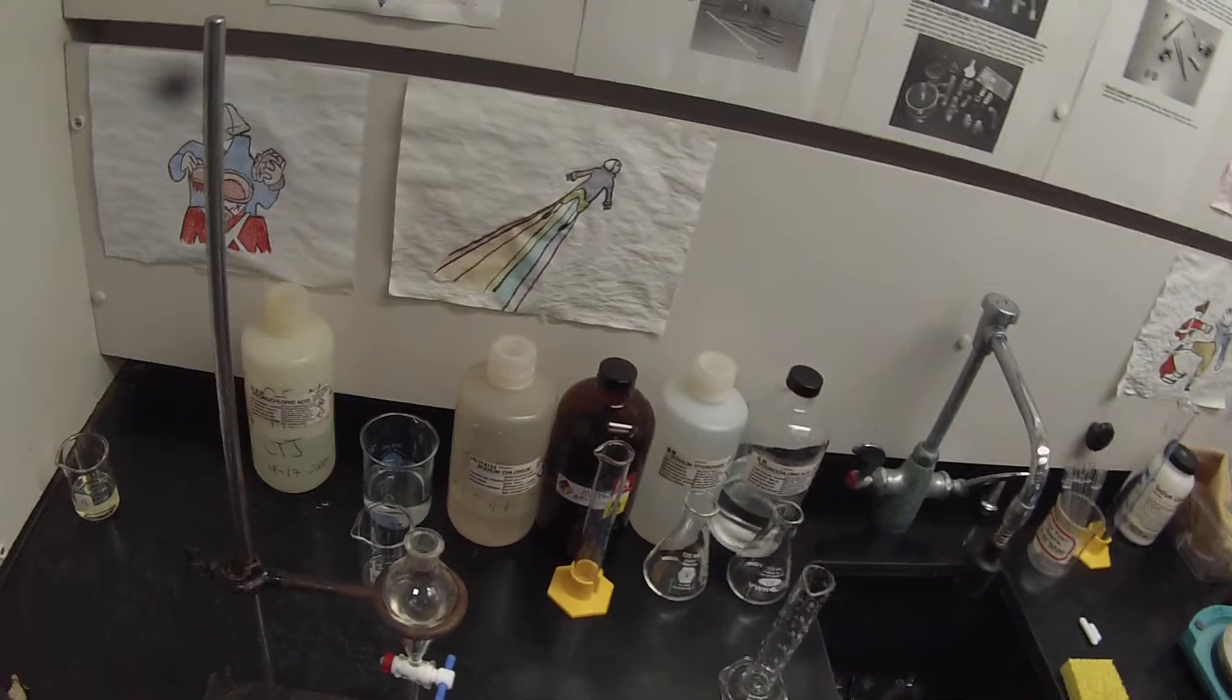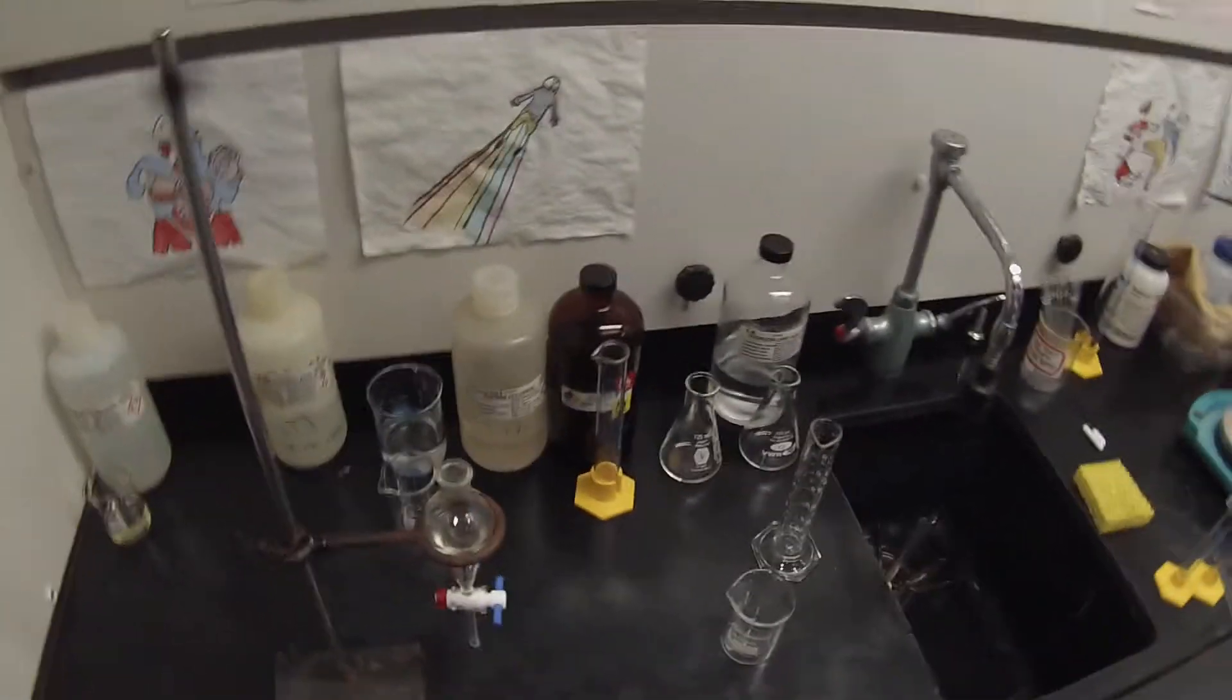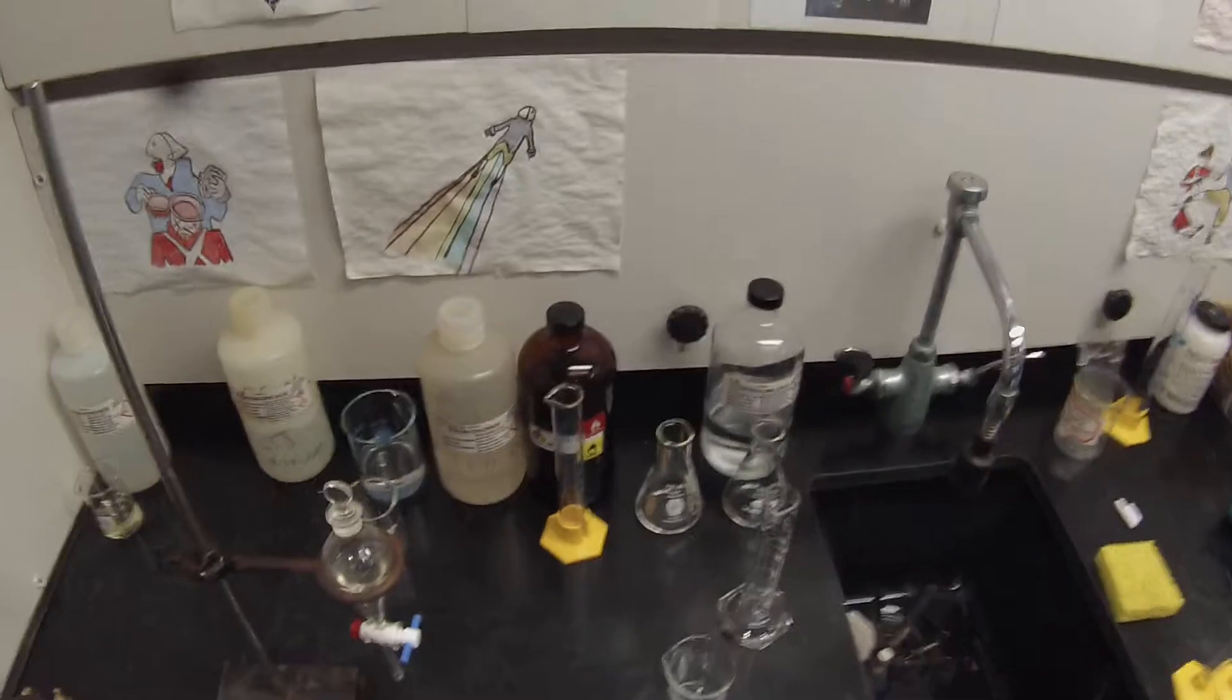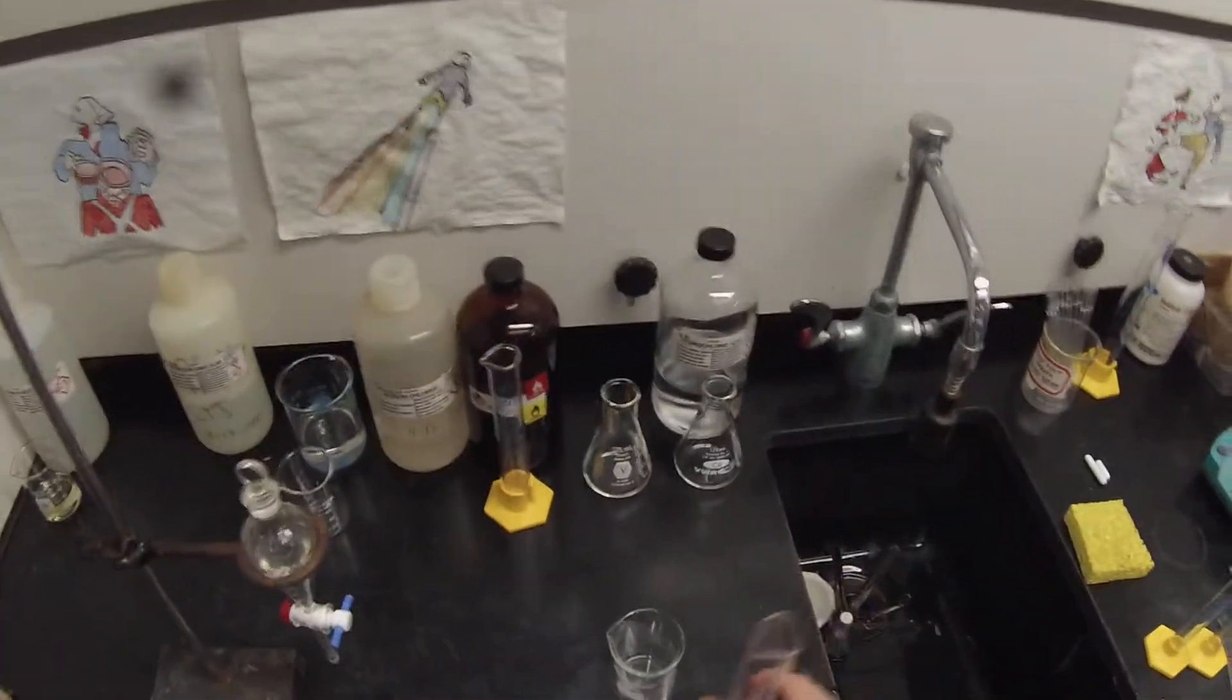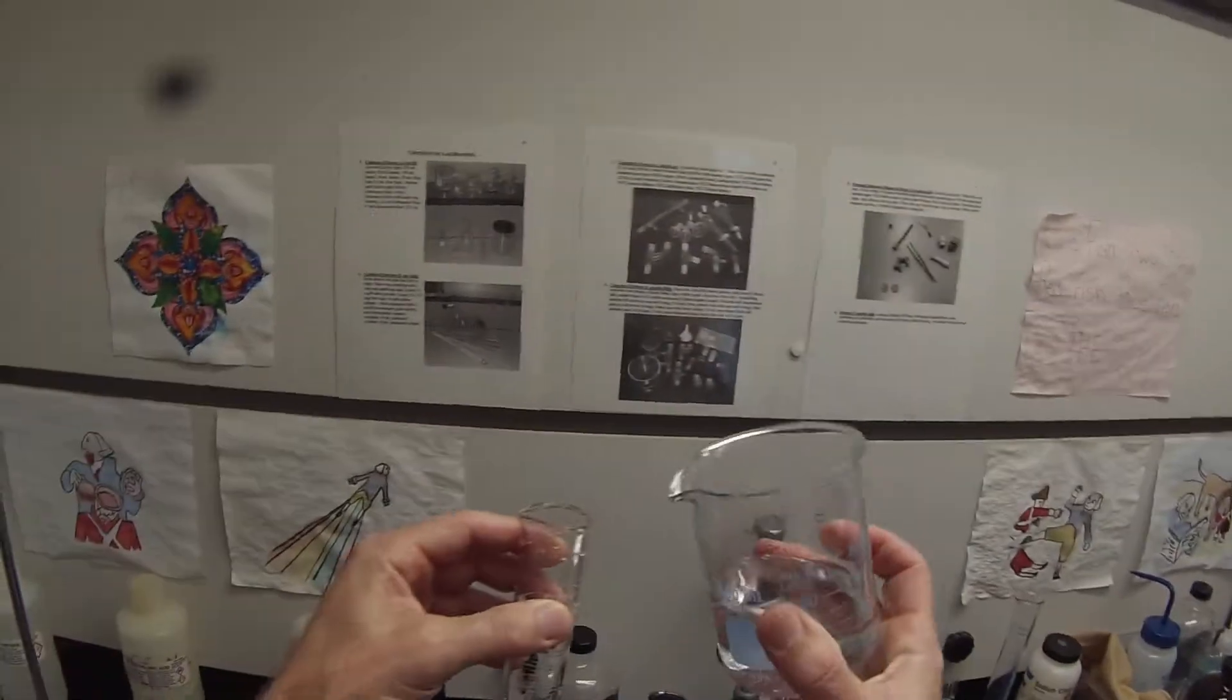We're going to set that aside. Later we will be taking that acid layer and neutralizing the acid with 6 molar sodium hydroxide and hopefully filtering out our tryptamine. I've rinsed the graduated cylinder that I'm using for my aqueous solutions.